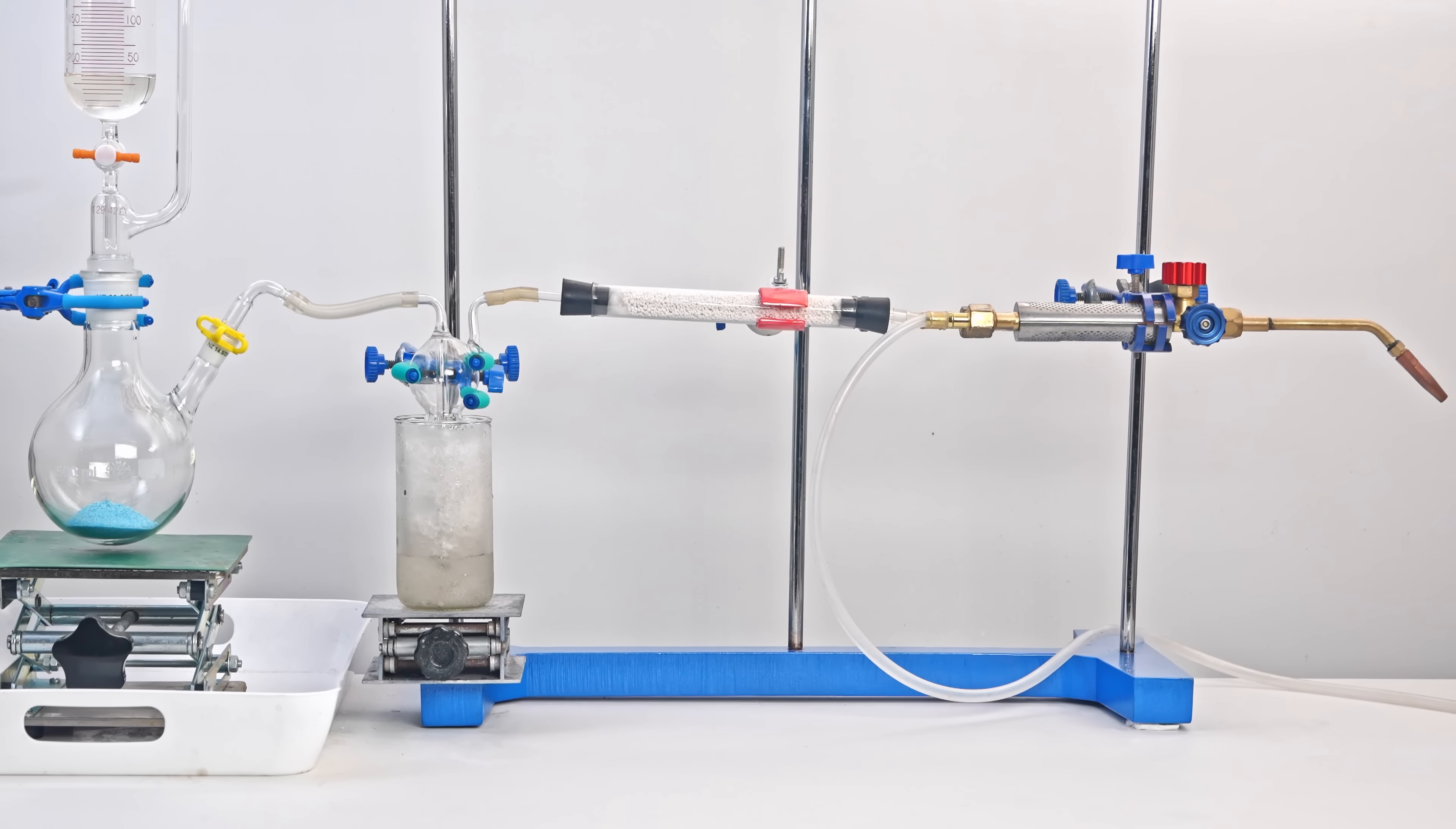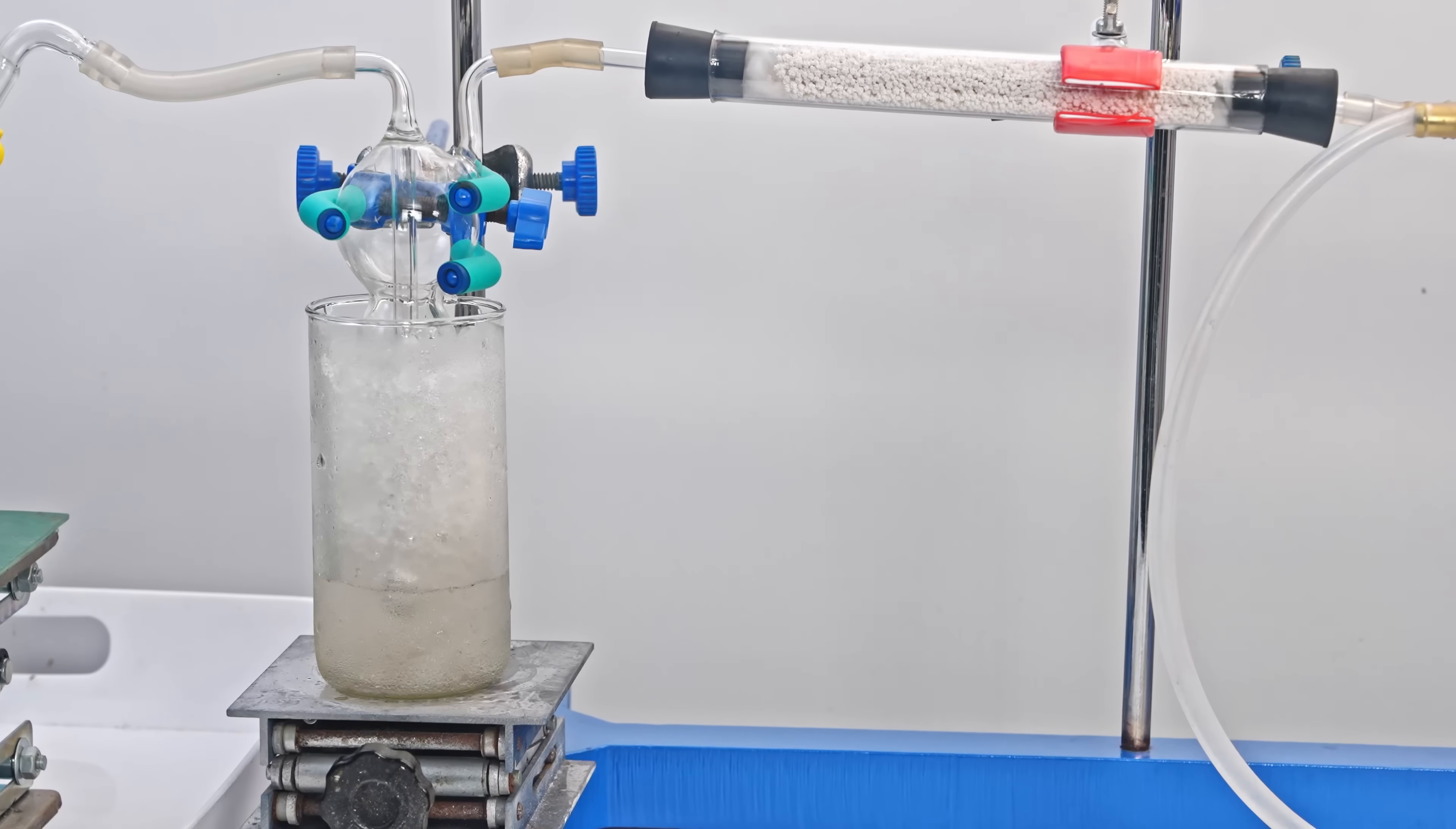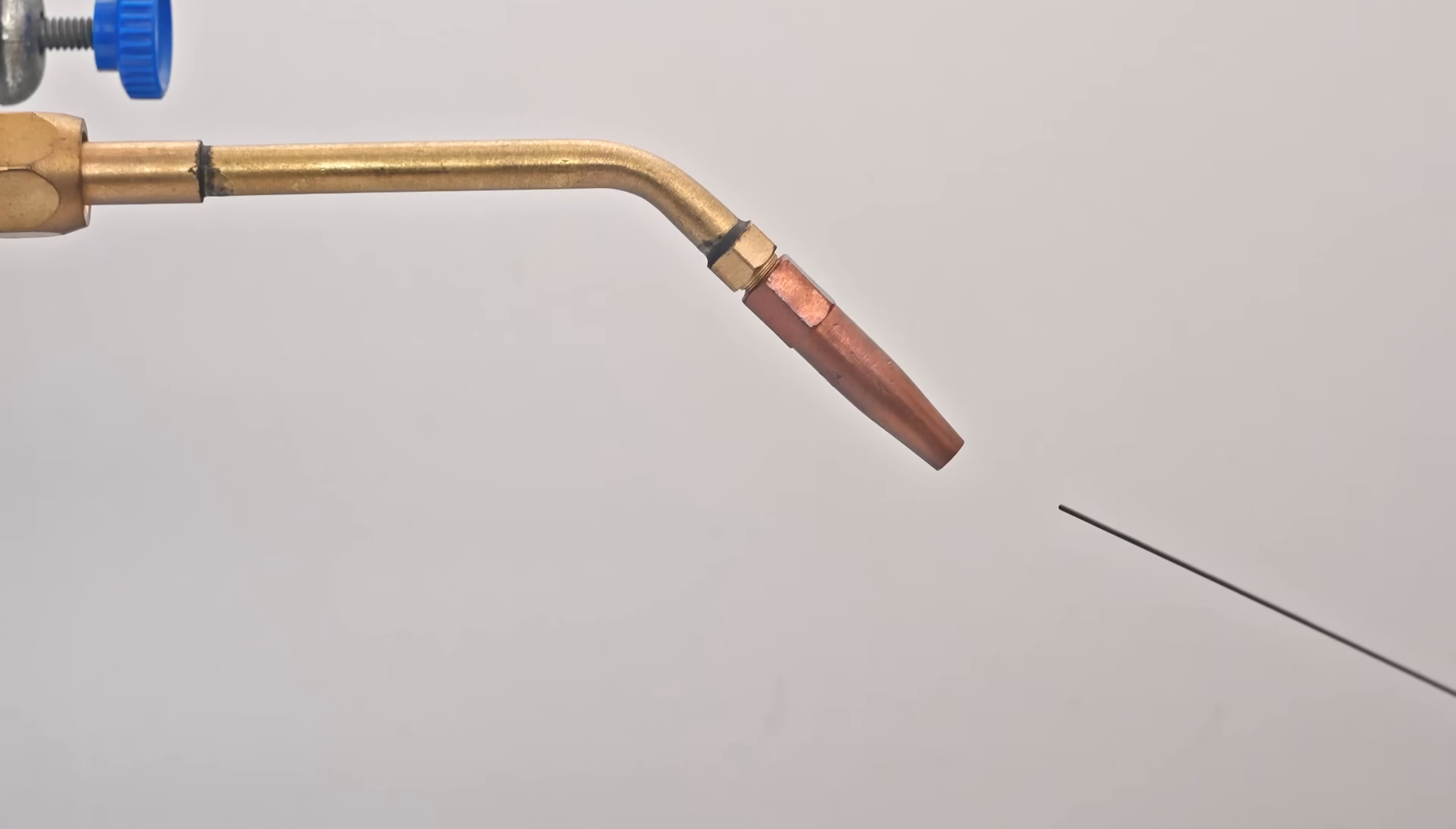To obtain more cyanogen, I'll use a different reaction. This will be the interaction of copper sulfate pentahydrate with a concentrated solution of potassium cyanide. In this reaction, the released cyanogen will pass through drying tubes and then combine with oxygen in an autogenous heating torch. After I get stable combustion of the cyanogen oxygen mixture, I'll bring a tungsten electrode to the flame, and we'll see if it can be melted.